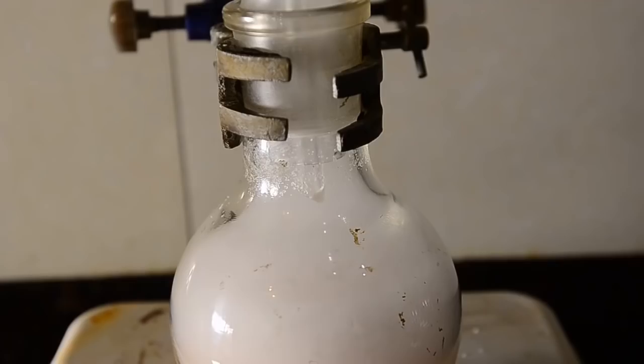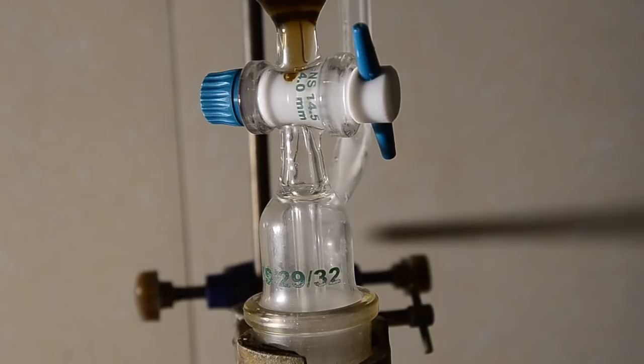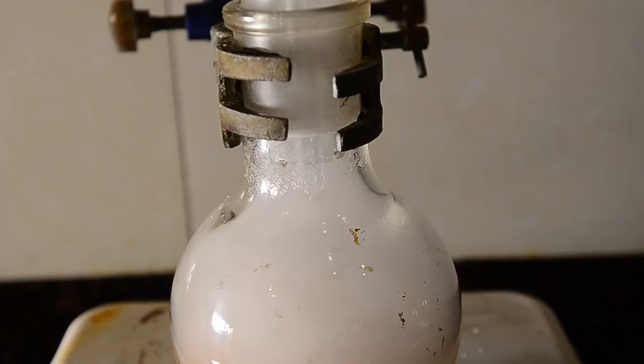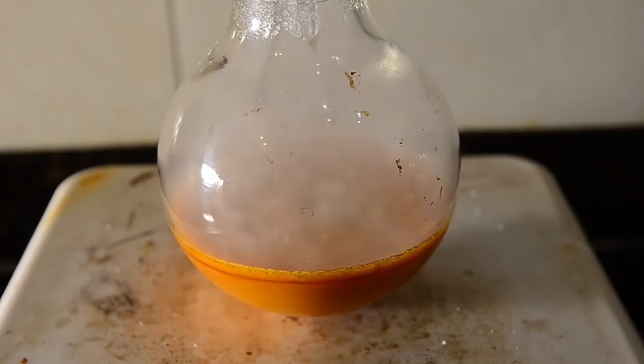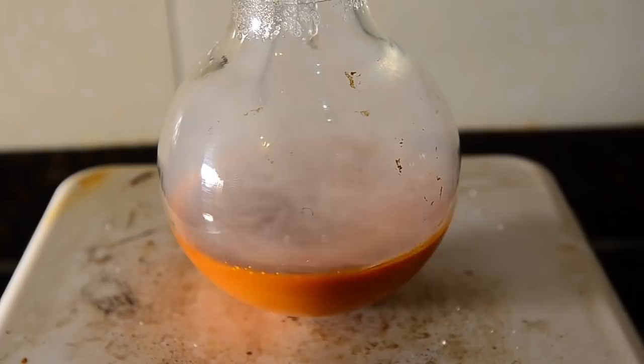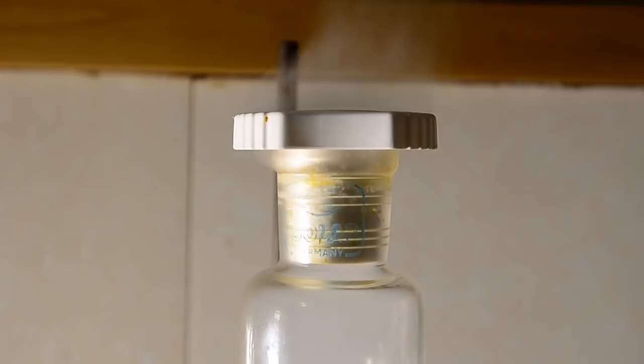Now begin the very slow addition of this to the vigorously stirred benzene mixture in the flask. A lot of hydrogen bromide gas is going to be produced and the temperature will increase. Don't allow the temperature to rise above about 50 degrees C. You will see an orange color and then the mixture will become dark.